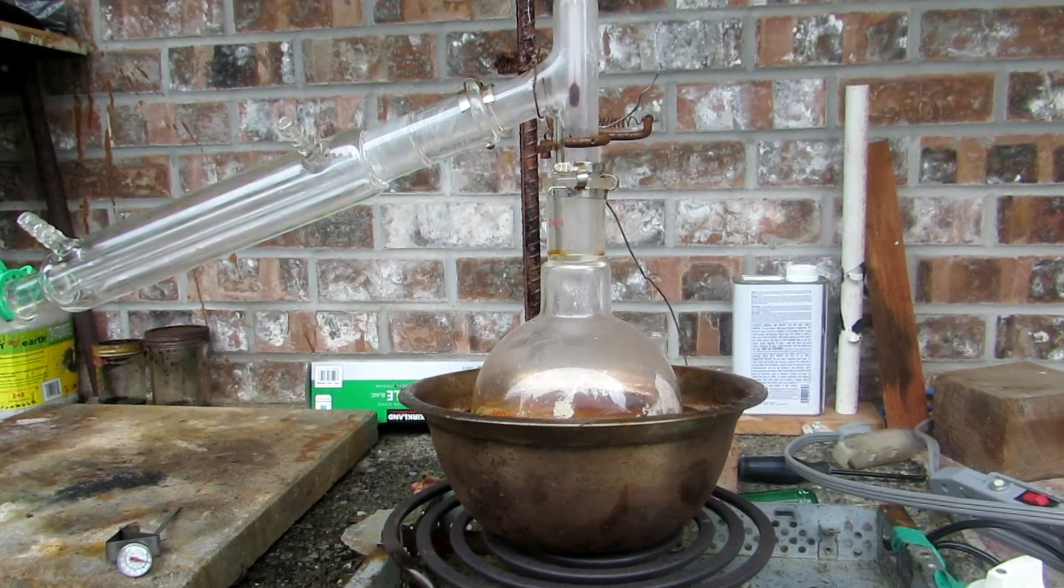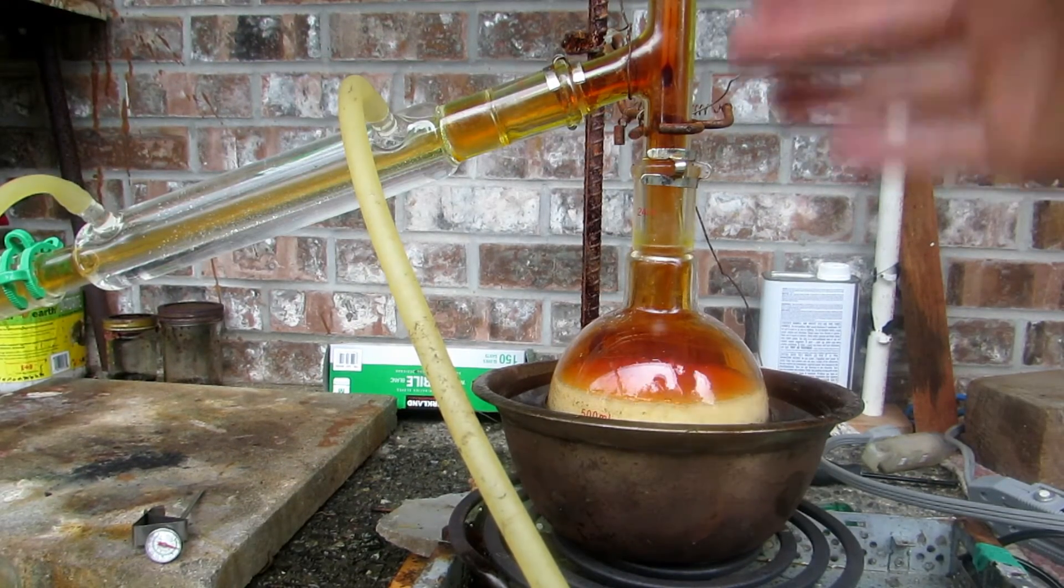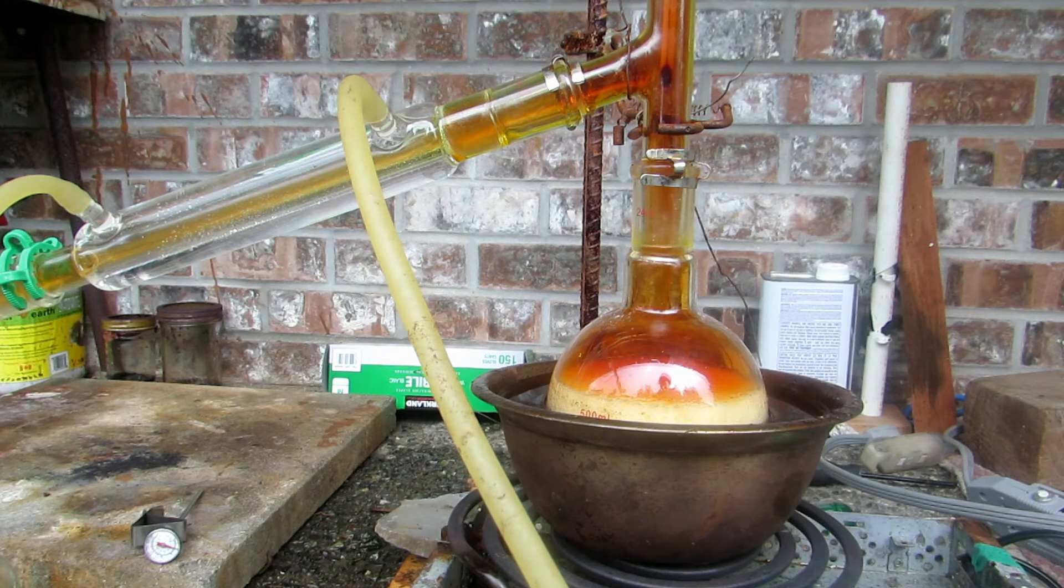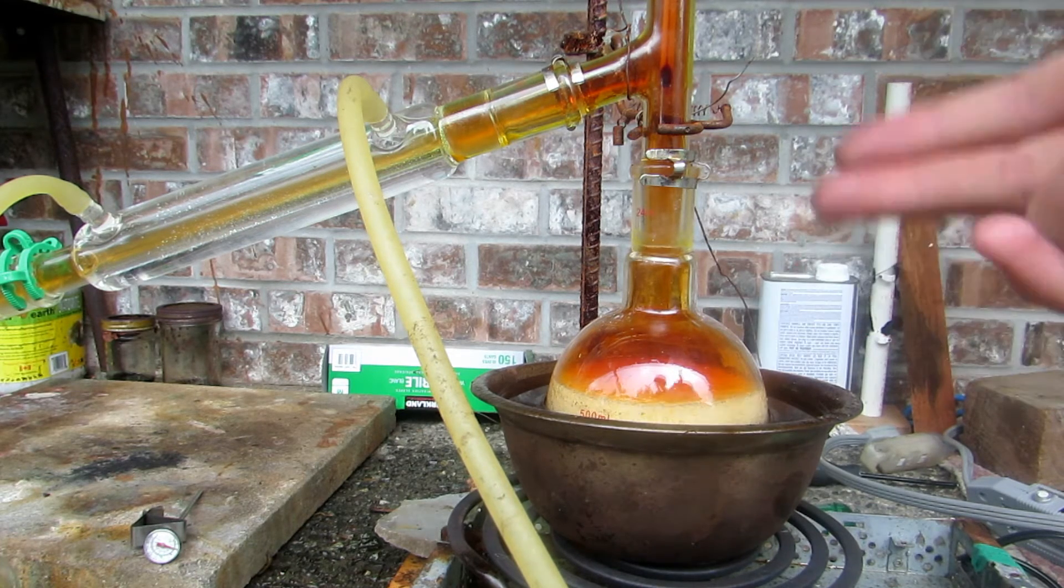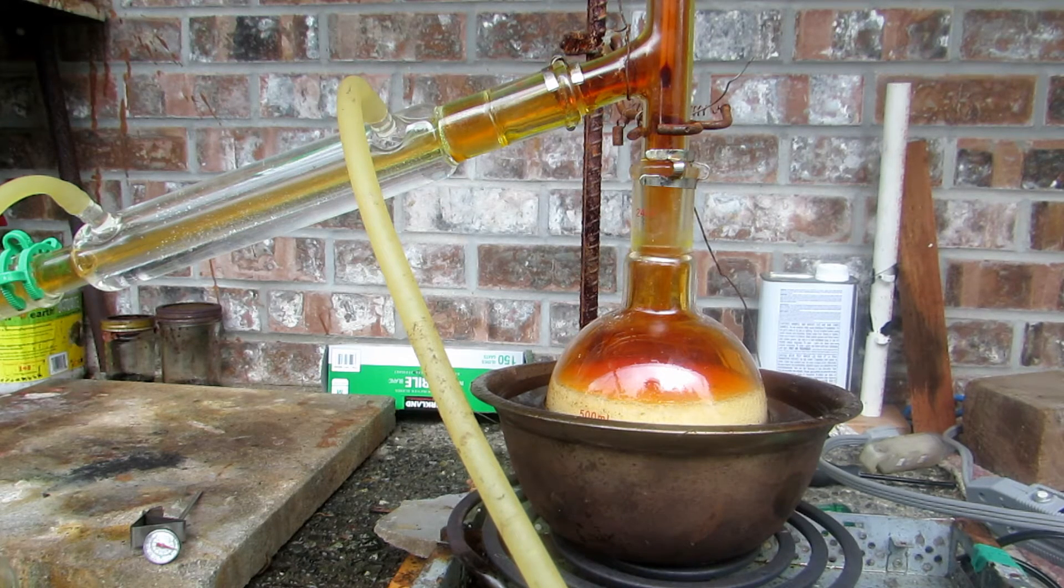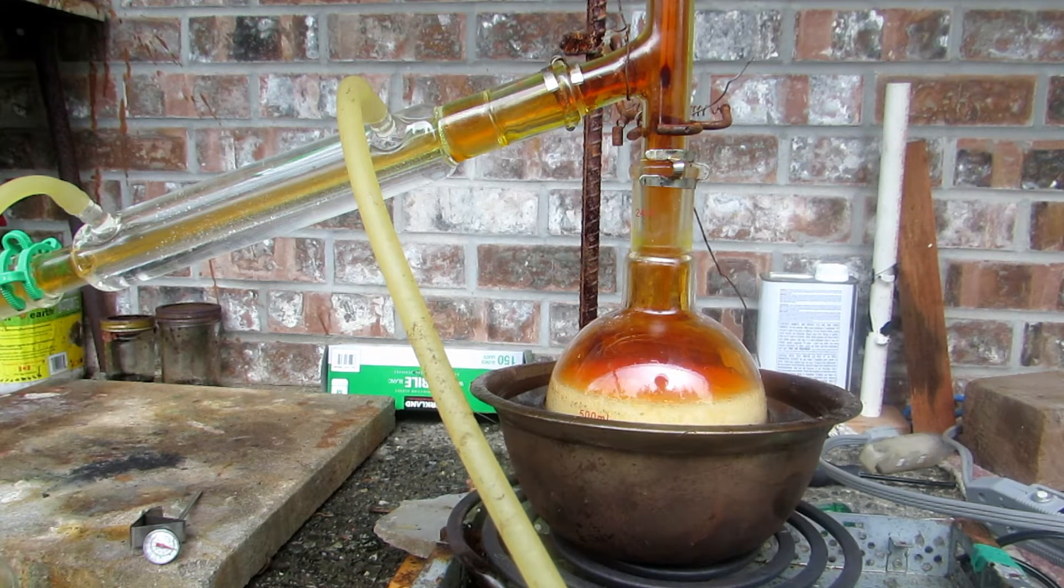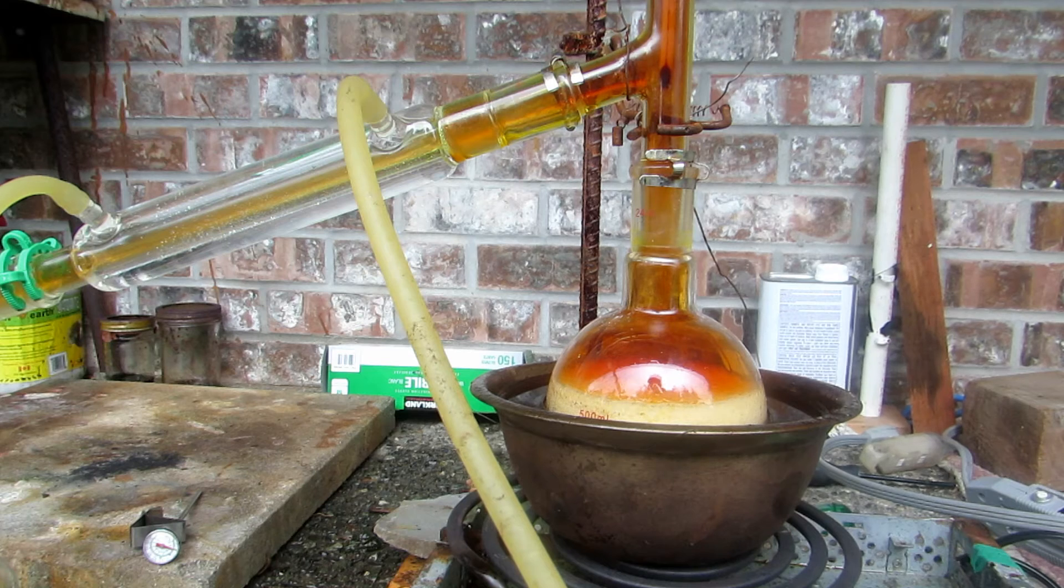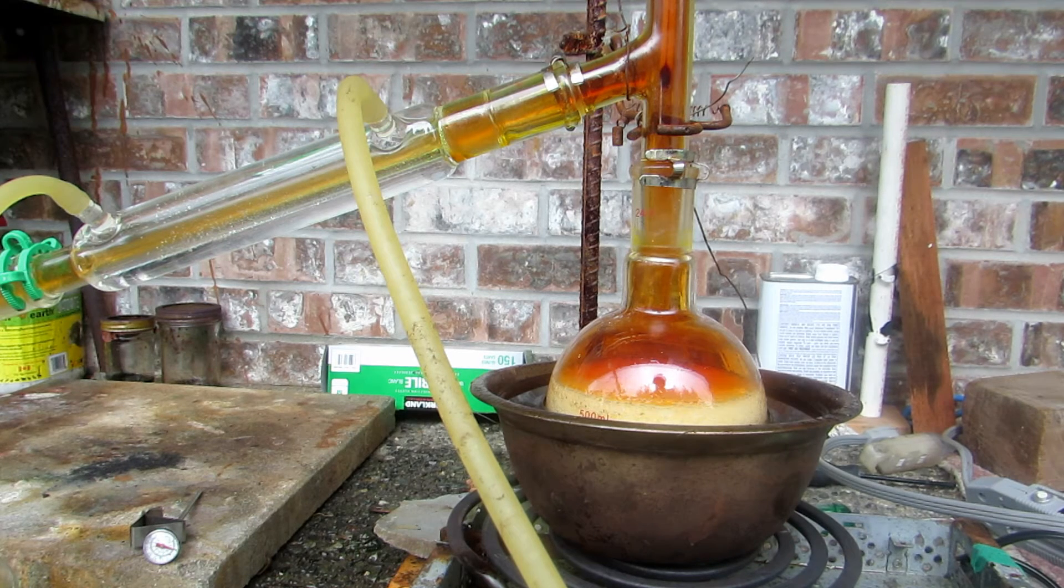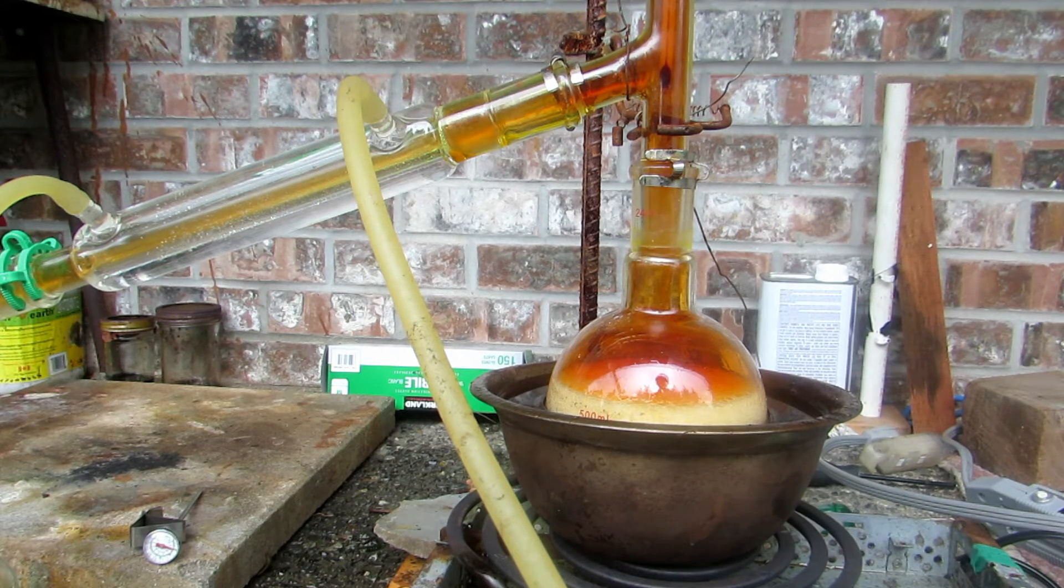Anyhow, so I've started heating it. I just need to connect up the condensing. And then I'll meet you back. So as clearly seen, we now have a beautiful red color. This is the nitrogen dioxide. And this should clear up in a moment. But the reaction has just started to vigorously proceed now. All of our nitrate salt has now dissolved into the sulfuric acid and has reacted, forming our nitric acid. And the temperature is increasing on this thermometer. It's around just under 60 degrees now. And our vapor front, I can see it going up. So we've started to boil away our nitric acid. And pretty soon we should be starting to collect some drops. And hopefully this will clear up. So I'll just let the reaction proceed until we've collected all the nitric acid and we're left with a solid chunk of sodium sulfate in our flask here.